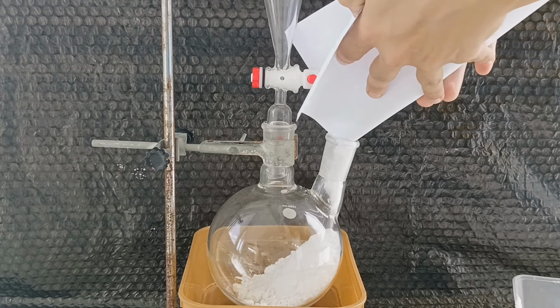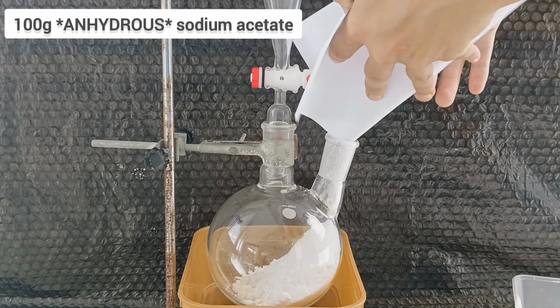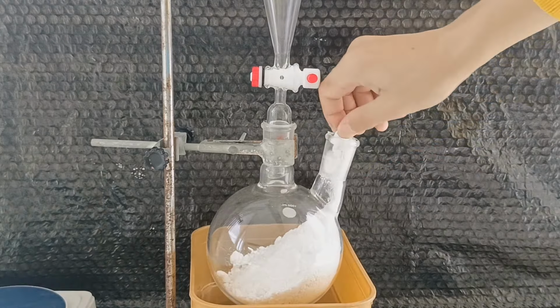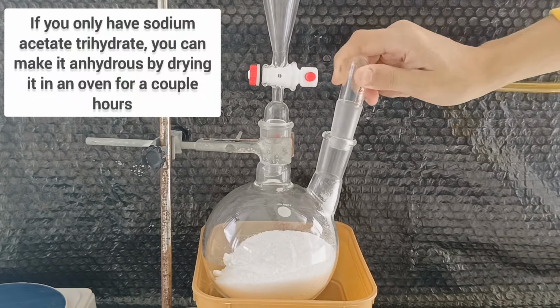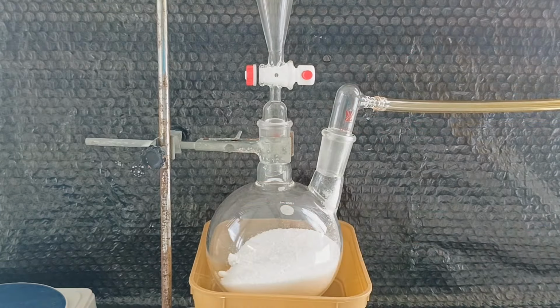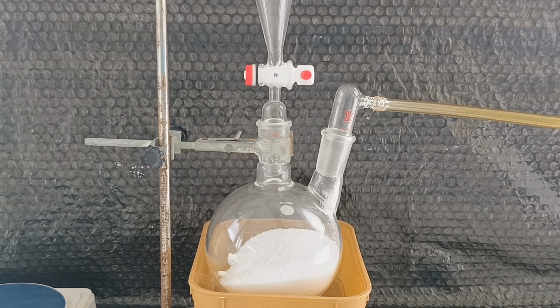To make the acetic anhydride, the first step is to add 100 grams of sodium acetate into a round bottom flask. It's extremely important that the sodium acetate is anhydrous and not the trihydrate. Any water here will destroy the acetic anhydride. I also added a gas adapter and a hose that led to outside the window to avoid breathing in any vapors.